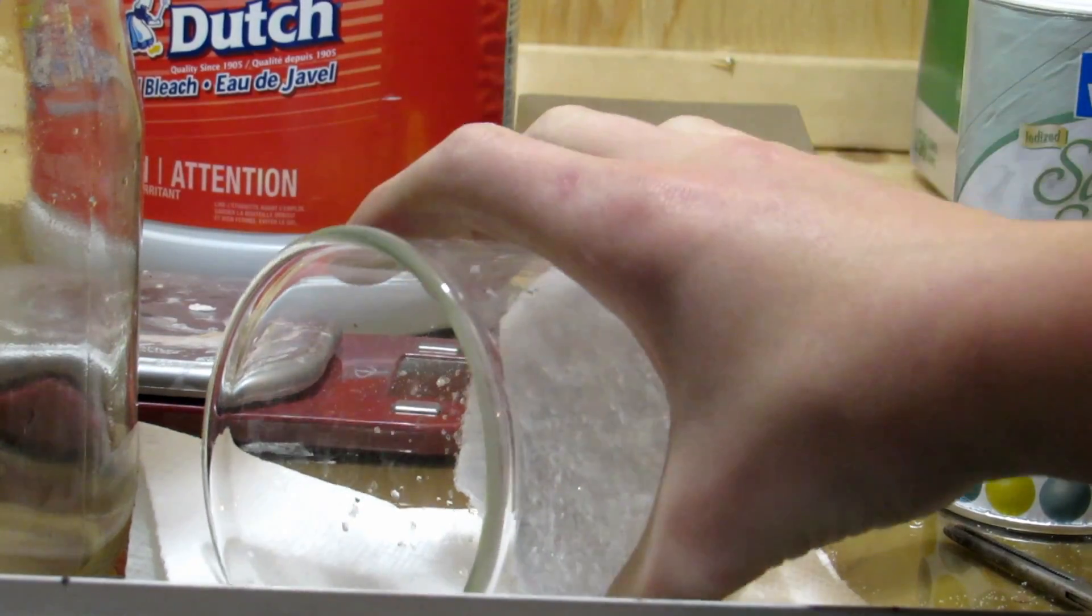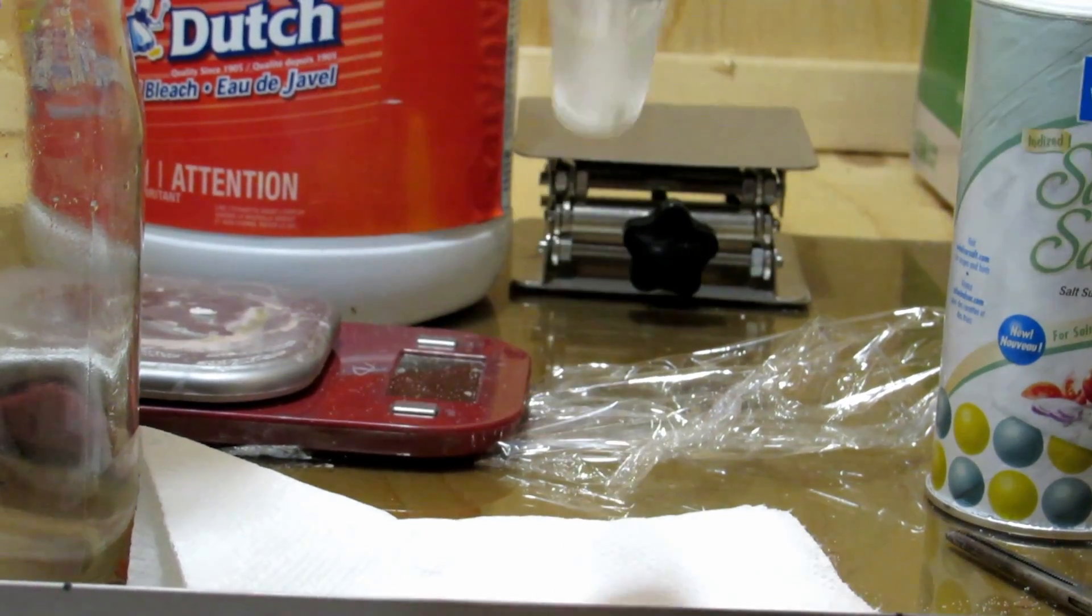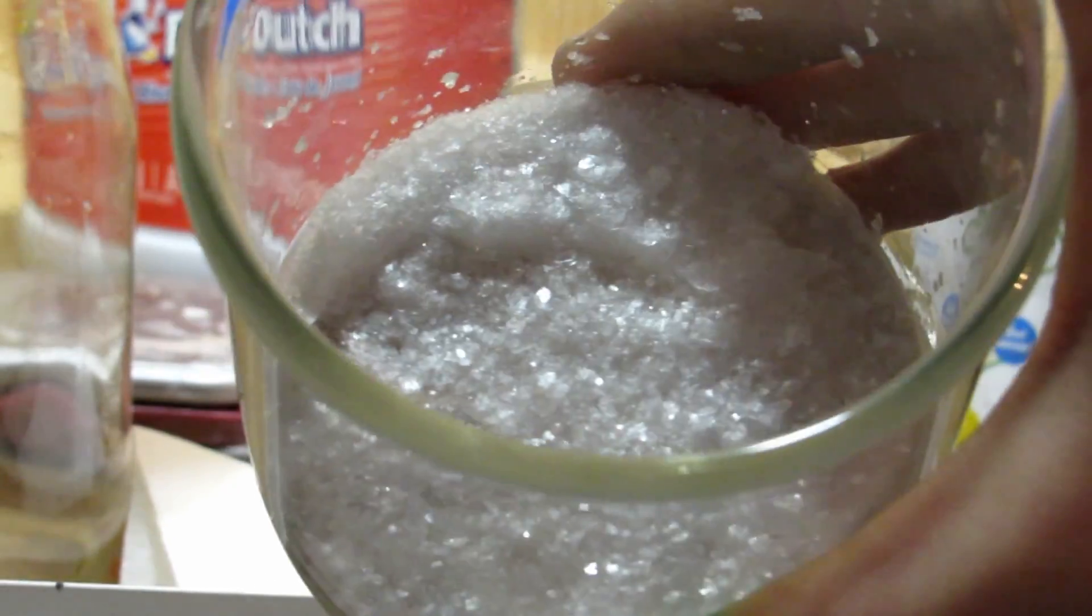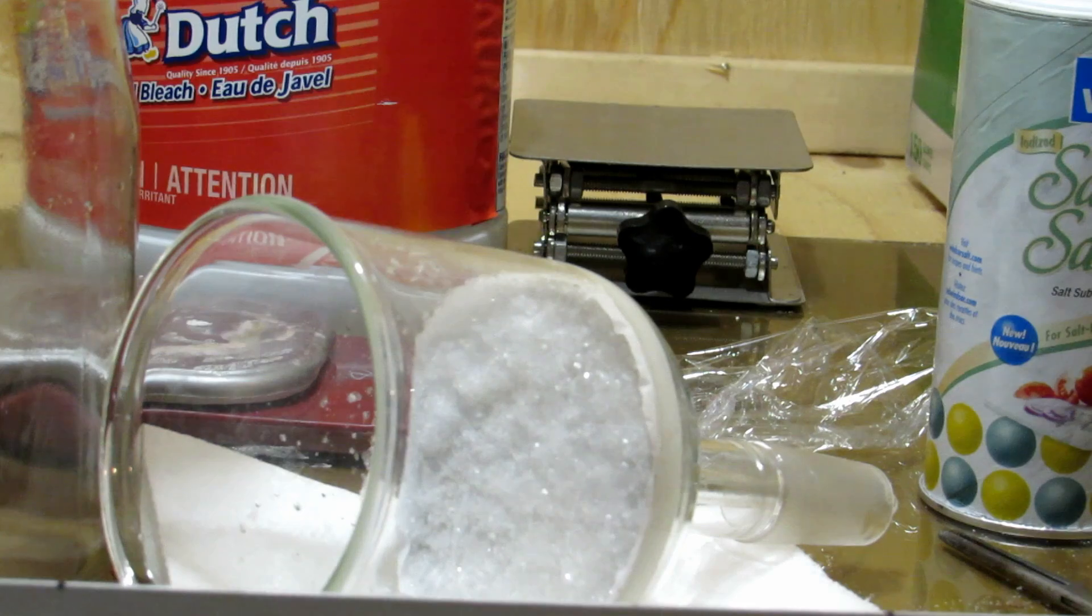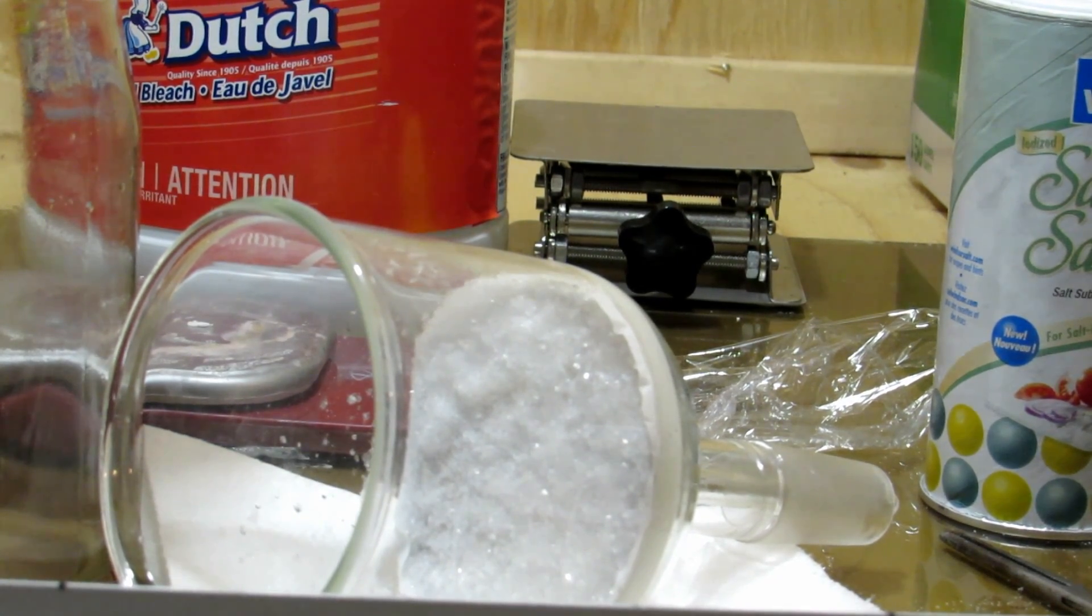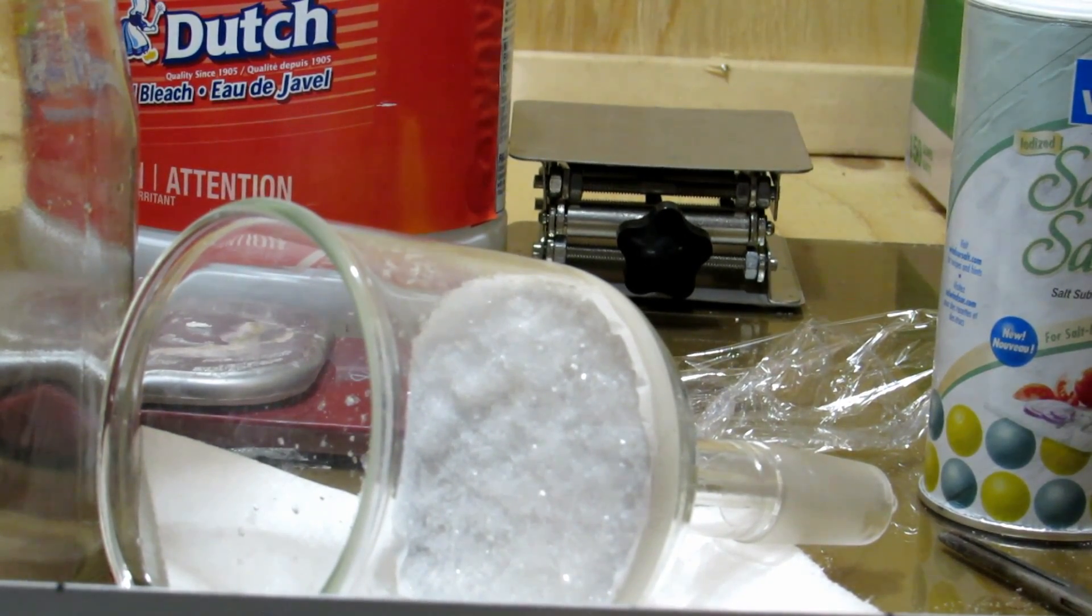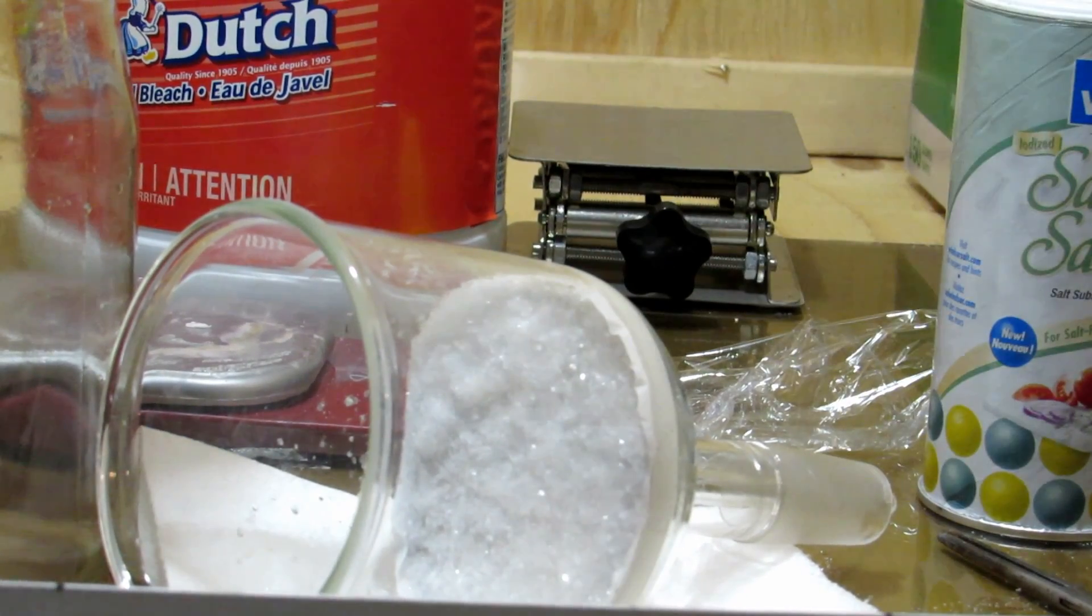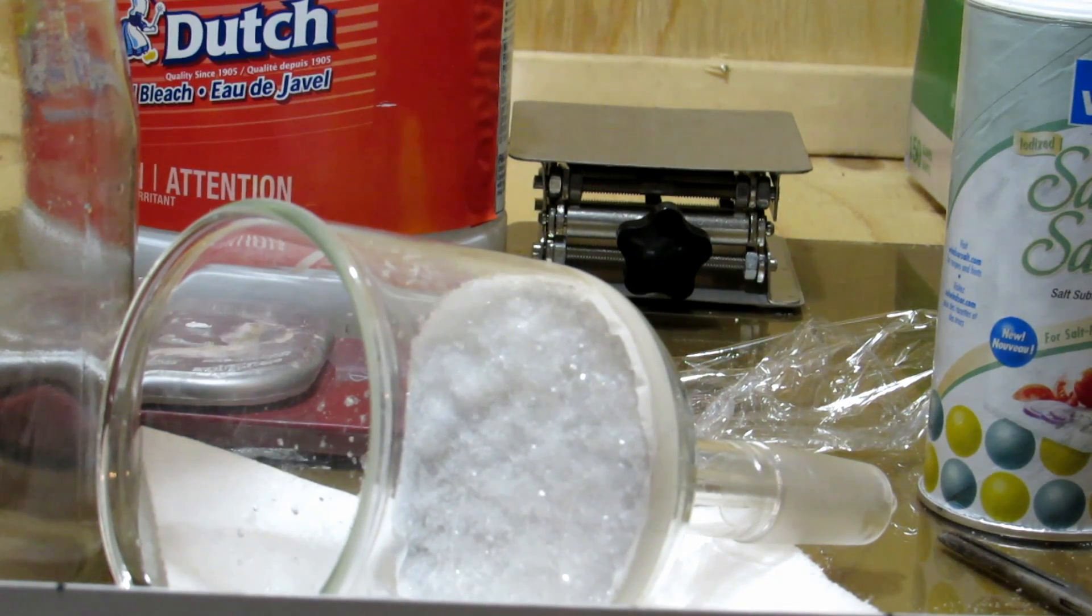Okay, so after that, the crystals fell out of the solution as expected. So I quickly filtered them off. And as you can see, we're left with some beautifully white square-shaped crystalline potassium chlorate crystals which are absolutely beautiful. I vacuum filtered them, and then I washed them with a teeny bit of cold water. Don't use too much though, because you're going to start dissolving some of your potassium chlorate here and you'll get a loss of yield. This is our quite pure stuff. But we should be able to squeeze a bit more out of our previous solutions by taking our previous solutions and boiling them down to probably around 100 milliliters.